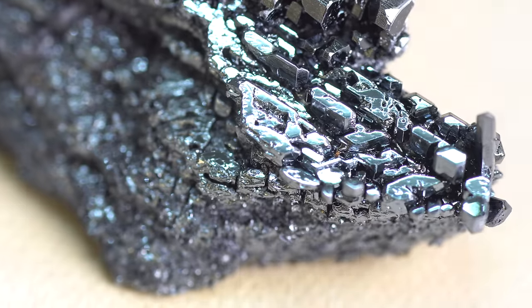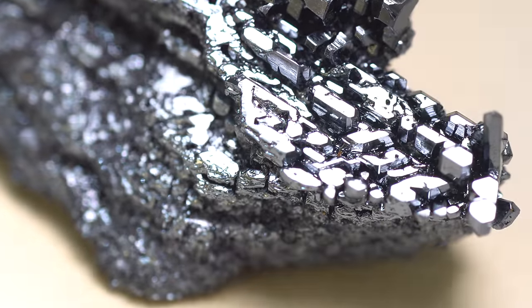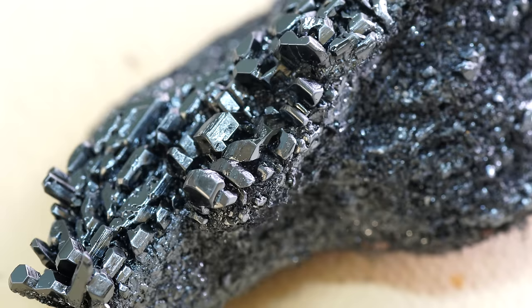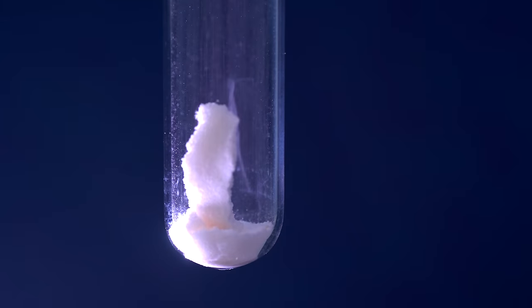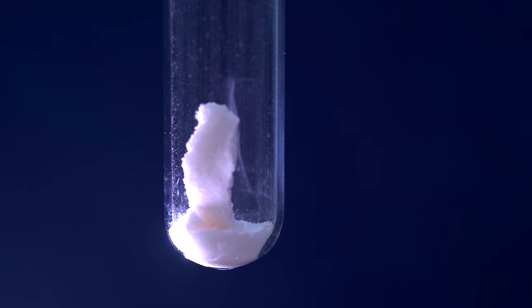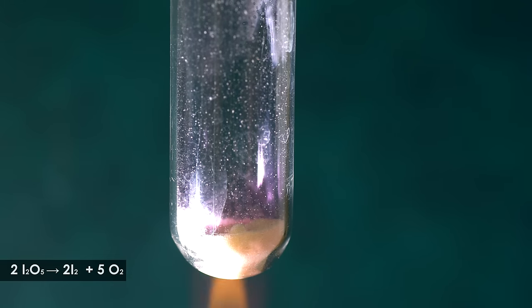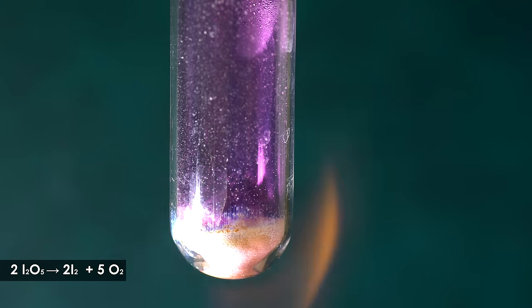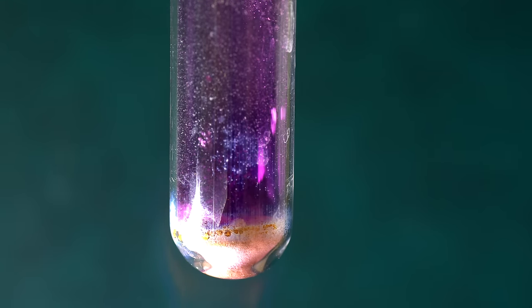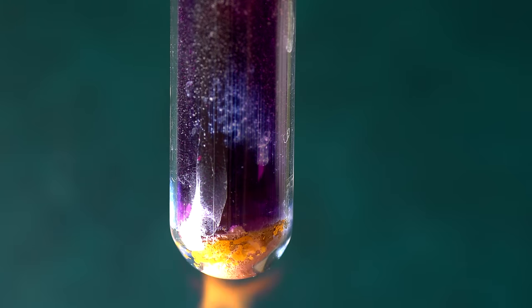However, elemental iodine is quite stable and doesn't oxidize when exposed to the air. If you run experiments not with elemental iodine, but with its oxide, the reaction will get much more interesting. The thing is, if we heat up iodine oxide, it will split into oxygen and elemental iodine, forming those beautiful violet fumes.